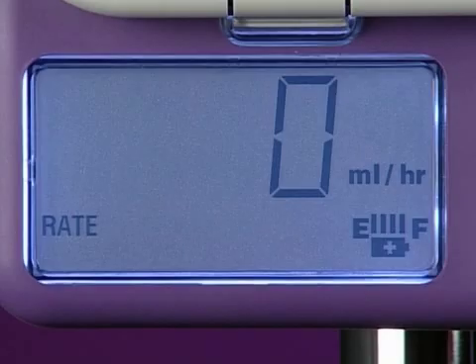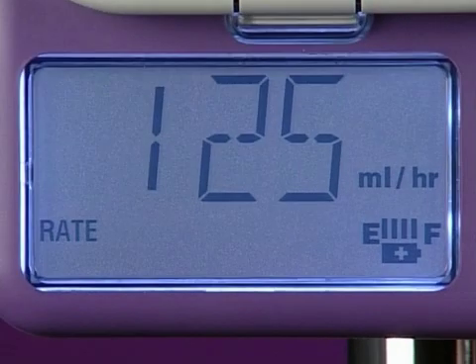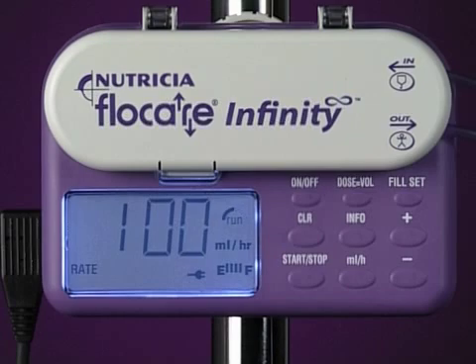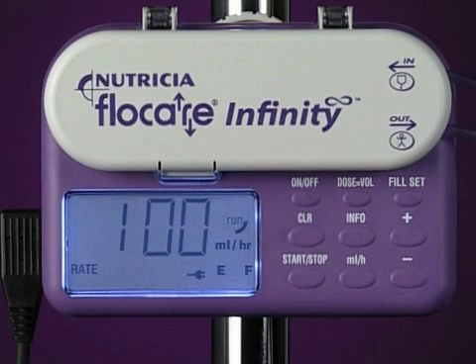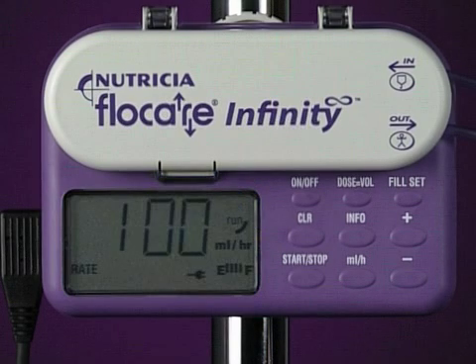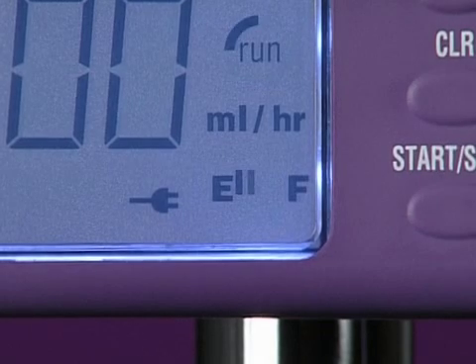It's recommended that you do this with each new patient. Please note that older Infinity pumps have a default flow rate of 125. We recommend that when possible, you run the pump from mains power. The plug symbol in the display indicates when you're doing this.